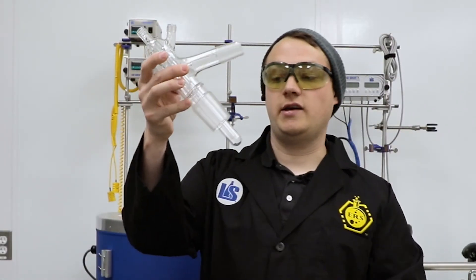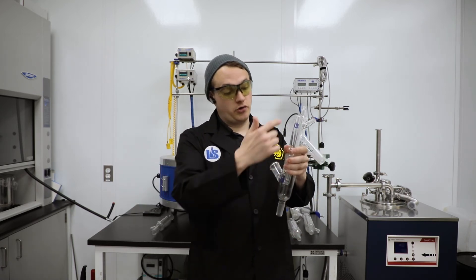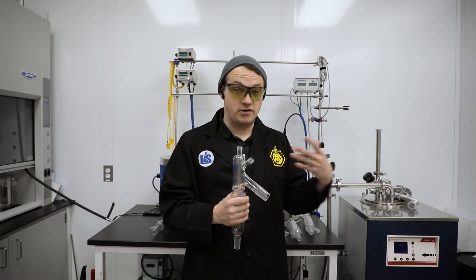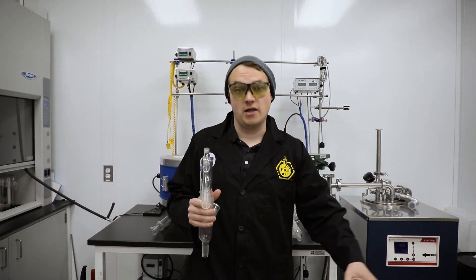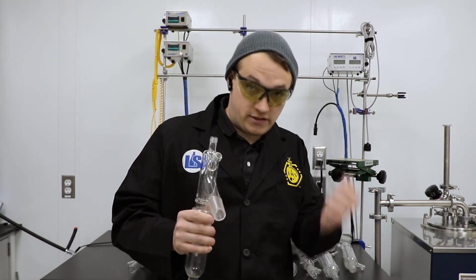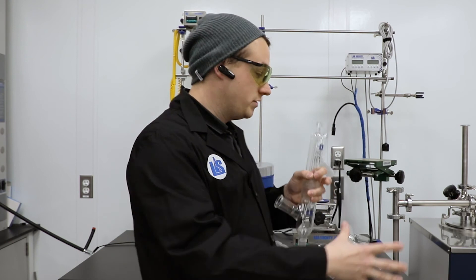This is technically a cold finger condenser. Cold finger condensers come in an array of different kinds. They're used as auxiliary condensers on wipers quite often. Ours is modular in the sense that we can put it downstream after our condenser and create a secondary condensation point, reducing the load on the cold trap. Creating areas of pressure drop in distillation systems greatly helps the vacuum system, because each area of pressure drop — shrinking molecules — reduces pressure at that point. What's great about doing that before the cold trap is we're slowing down the molecules before they get there, so the cold trap works better and we don't need as strong a vacuum pump. Not using an overly strong vacuum pump helps the longevity of the pump because we're not sucking contaminants into the pump oil — instead it's condensing where it's supposed to condense. That's the principle behind all of our systems: keeping liquids inside the system at the right point to increase the longevity of all our equipment.